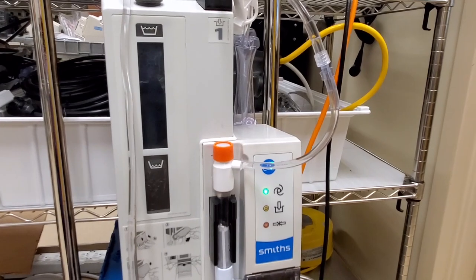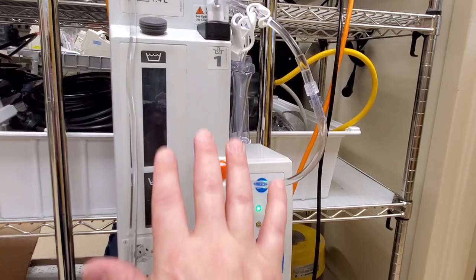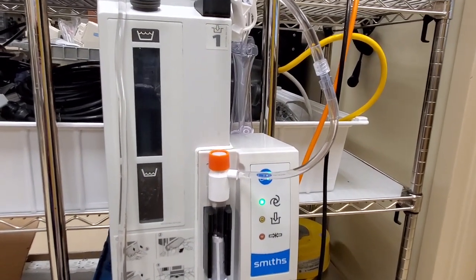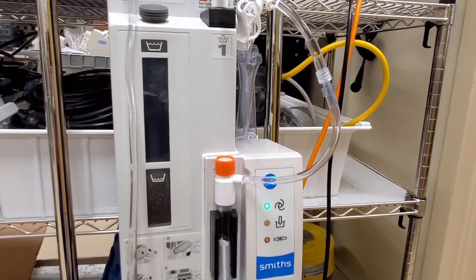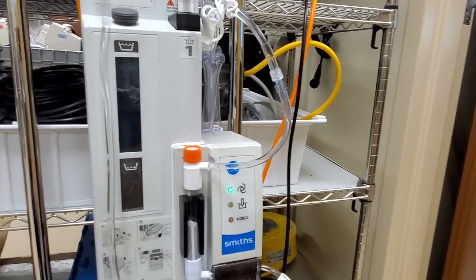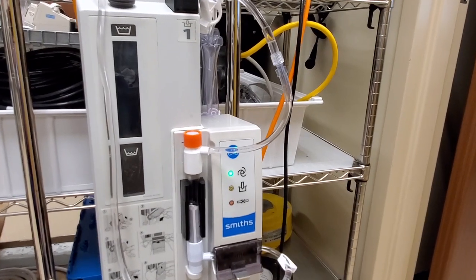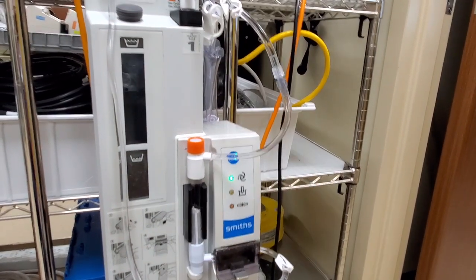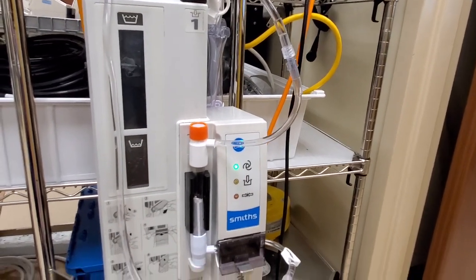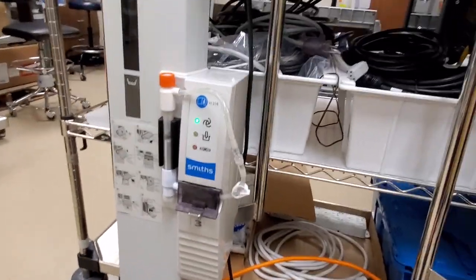And any of you guys that have been biomeds for a while, you know that there are stringent regulations on water reservoir heaters because they have a tendency of developing certain strains of bacteria and fungi if they're not sanitized regularly. So these guys have a pretty stringent PM policy and I've read different versions of PMs over the years. We're not going to exactly go into a PM because obviously that could date this video really quickly if they decide to change their procedures. But anyway, this one here is a unit that's under test.